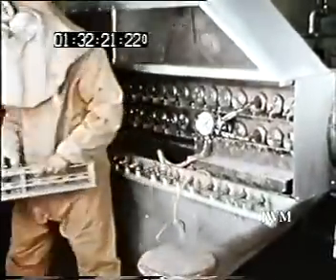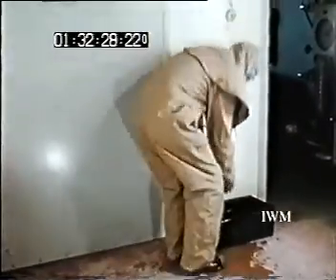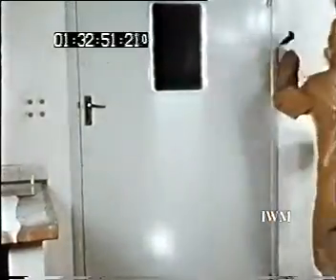Samples are transferred to bottles which are then sealed. They are disinfected on the outside and placed in the airlock in a transit box for safe transport to the assay laboratory. The number of samples taken here has in fact been reduced to a minimum to help make the operation clear.